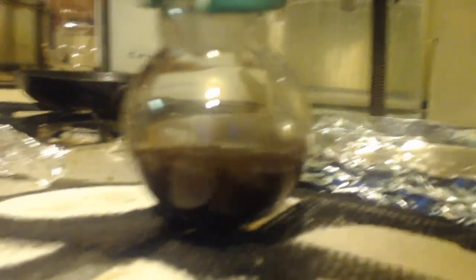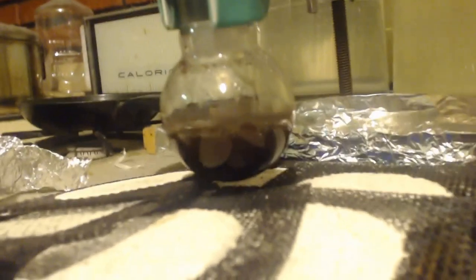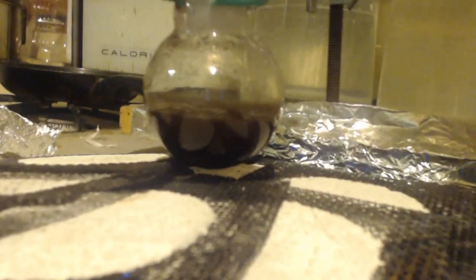Now, I don't know what the deal is, but it's turning black. The stillhead temperature is about 70 C. The temperature of the boiling flask here is 116 Celsius. So my whole point is everything from here down, everything in that pot, except for a little bit of the high boiling stuff, is my product. So how much is in there? It's a little less than that. Hopefully, I'll get 20 milliliters. I'm hoping.